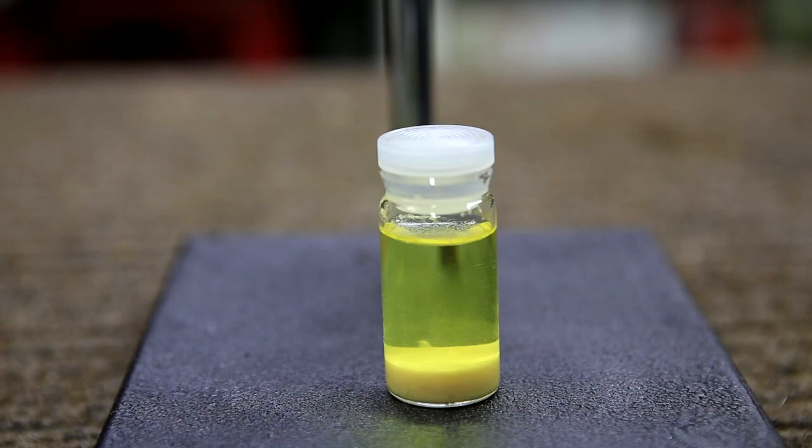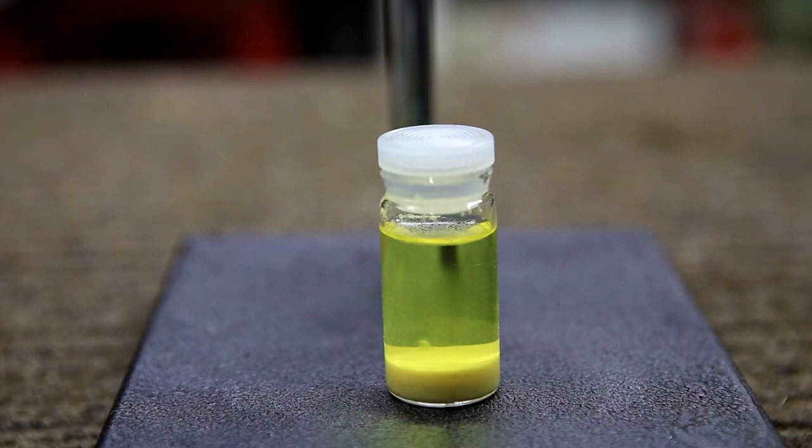This is my final yield of picric acid, and I'm actually not sure how much it is. I chose not to deal with any dry and potentially explosive picric acid, so I never got a chance to weigh it. For storage, it's always important to keep it under a layer of water.